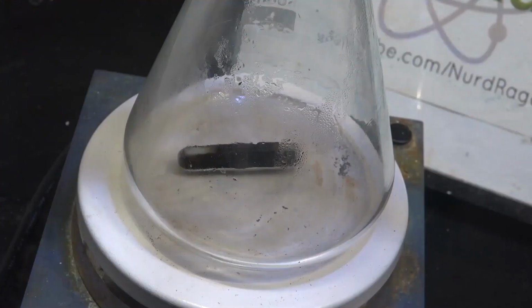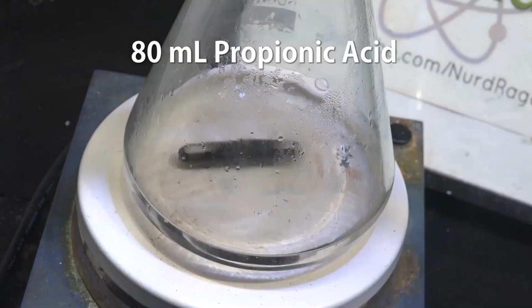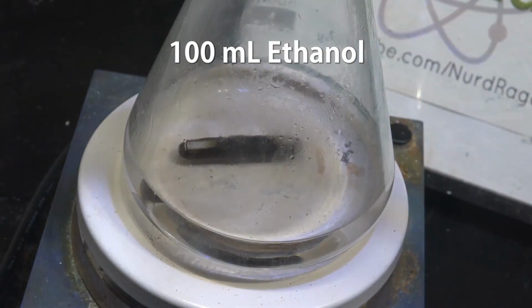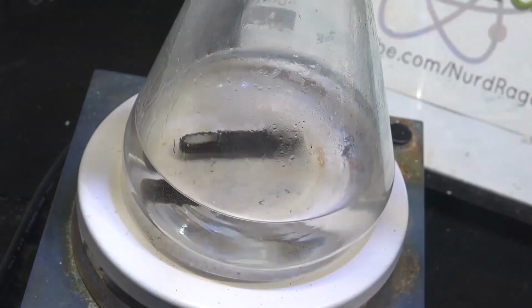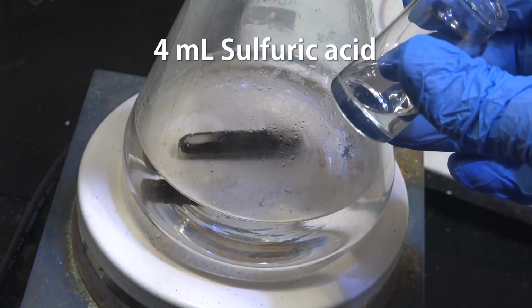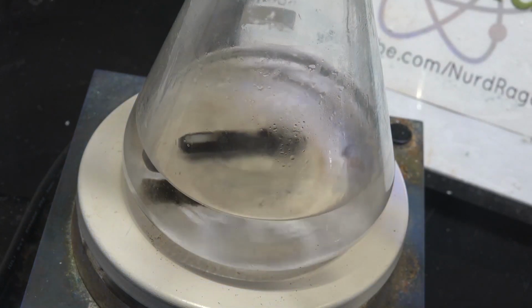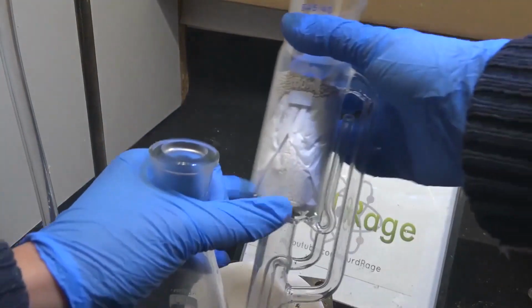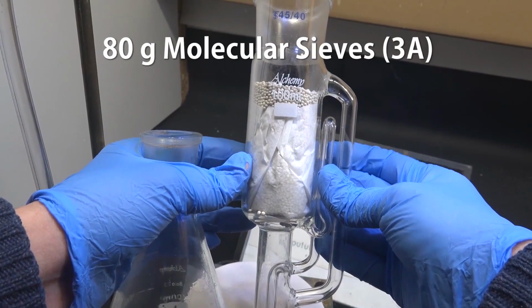First, we start with an Erlenmeyer flask and add in 80 milliliters of propionic acid. Then we add to that 100 milliliters of ethanol. Normally, you would remove any dissolved water first, but in this case we don't have to, as we'll be removing the water during our reaction. Finally, we need an acid catalyst, and we'll use 4 milliliters of concentrated sulfuric acid. The process so far is just like regular Fischer esterification. Now for the important difference. Instead of a simple reflux apparatus, we set up a Soxhlet apparatus filled with molecular sieves 3A.